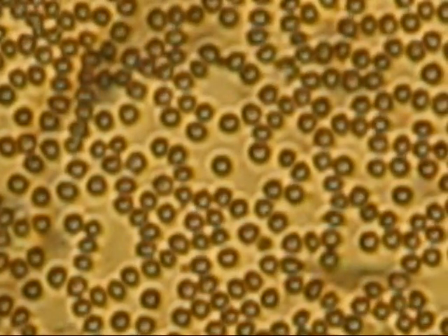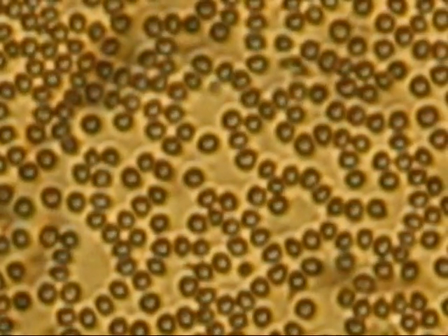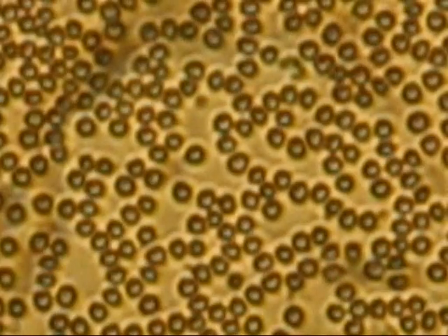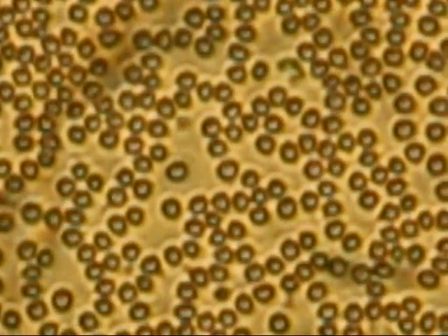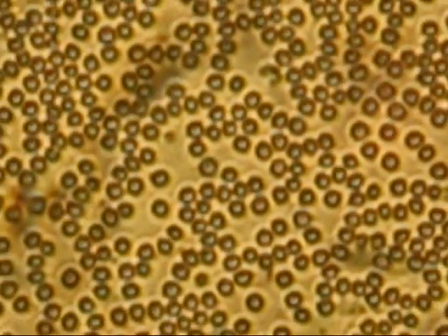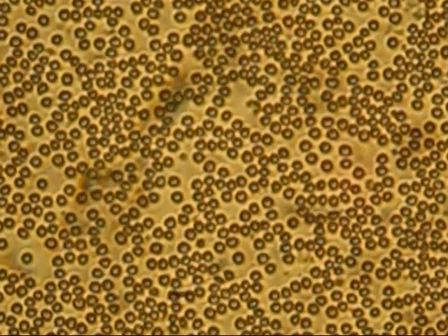Und wie die fließen, und vor allem, sie sind einzeln. Das sind rote Blutkörperchen.